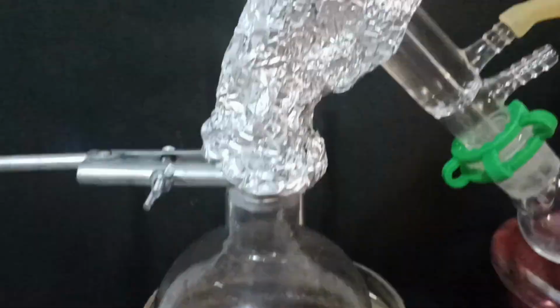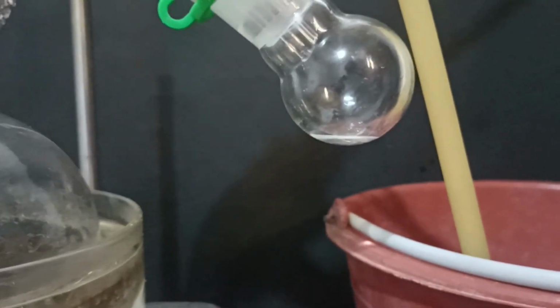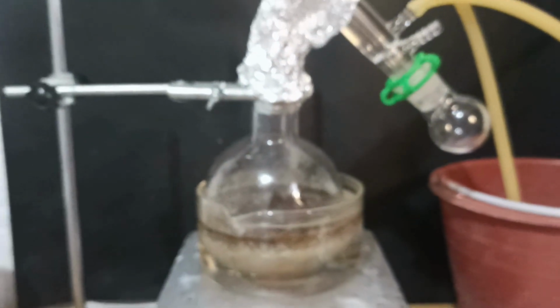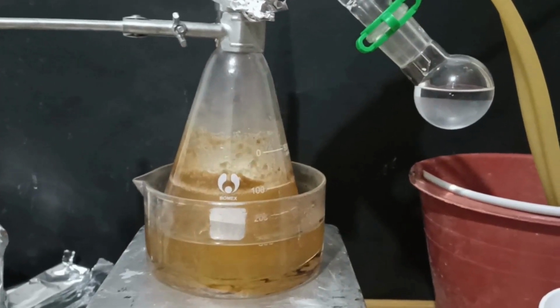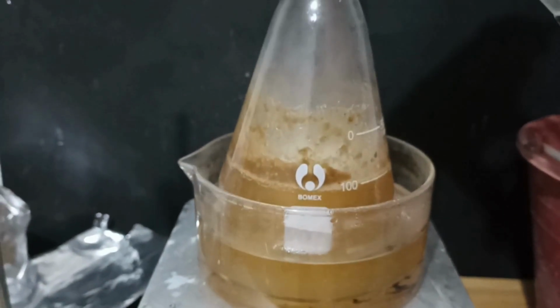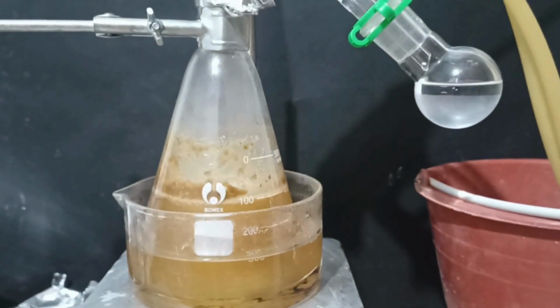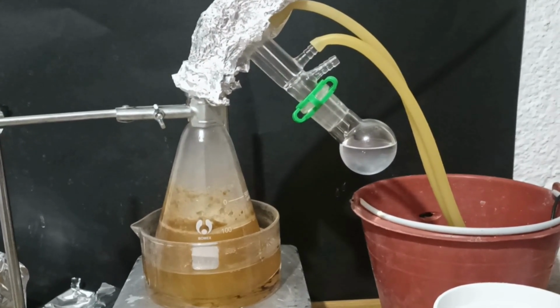When the bath was around 100 C, all the water was distilled out, and the sodium hydroxide started precipitating. The stir bar had a hard time trying to mix the reaction, but anyway, diethylamine started coming out when all the water finished distilling. The bath was around 200 C. I moved the reaction to a conical flask and removed about half of the sodium hydroxide. I placed a bigger stir bar and definitely the reaction worked better. Two phases appeared in the receiving flask, the upper being diethylamine and the lower being glycerin with water.